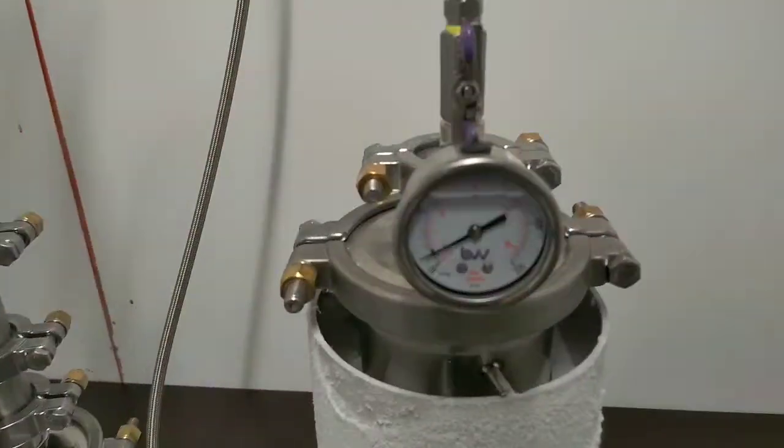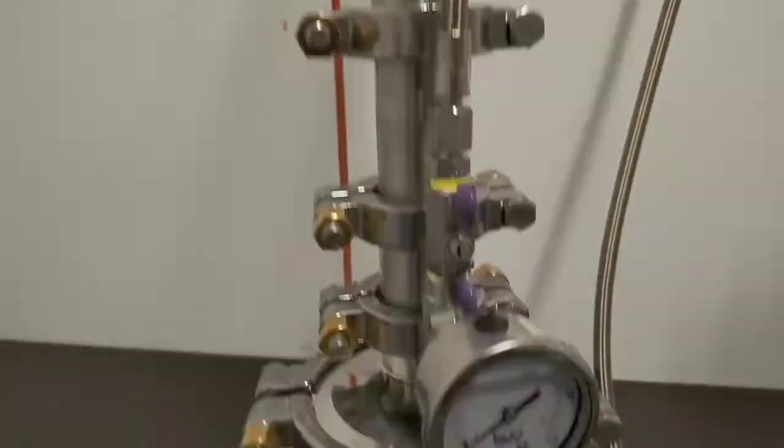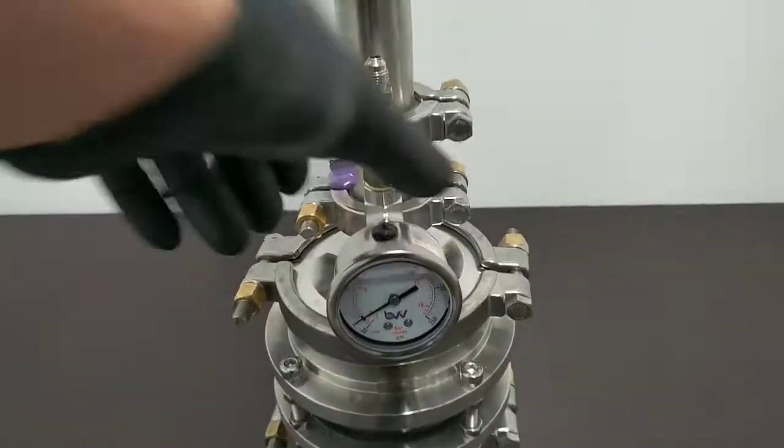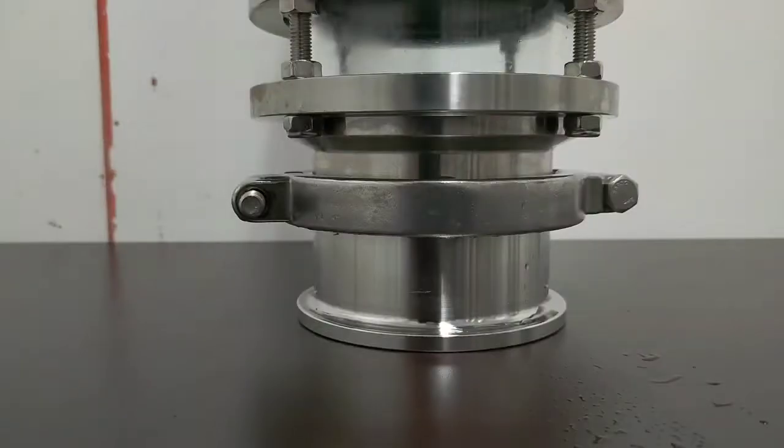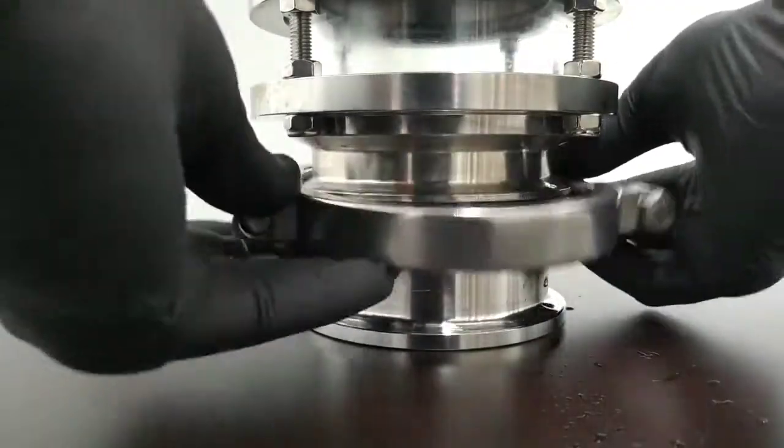Allow the solution to boil until all three gauges on the system read zero PSI, then close off the recovery line valves, remove the line, and vent the collection base to atmosphere.